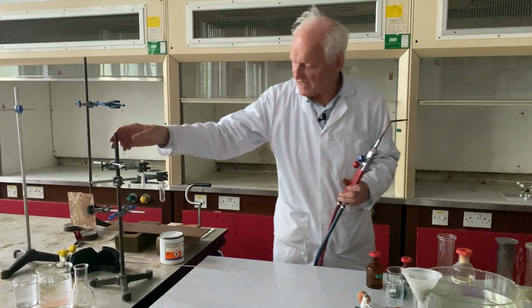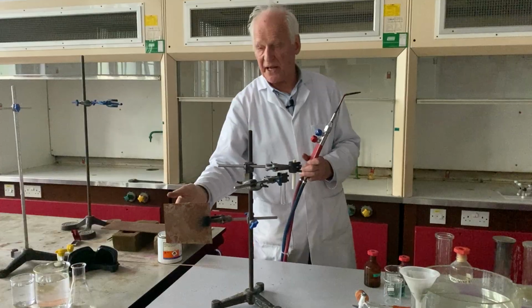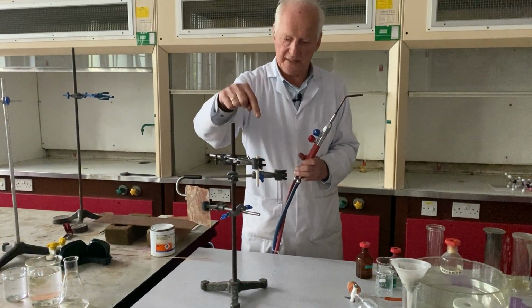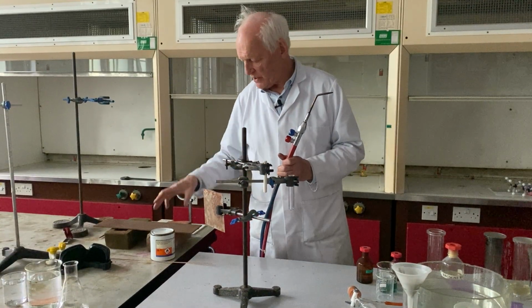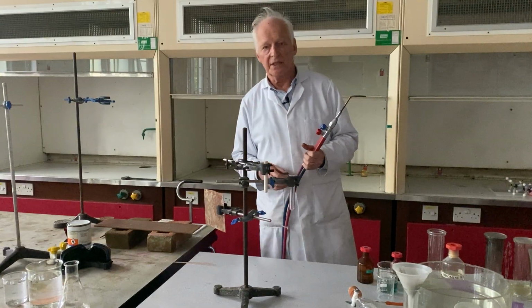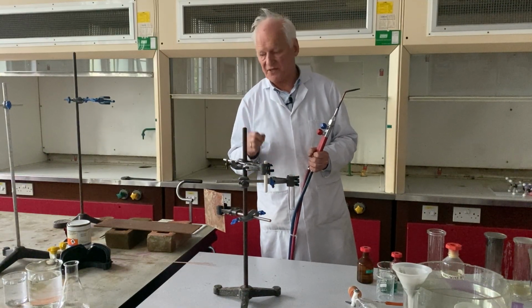In my retort stand here, I have got 3 items. One of them you see is a plate of steel, one of them is a glass test tube, and here is a stick of chalk. And I'm going to show you, in turn, one at a time, what happens when each of these are subjected to the very high temperature of an oxyacetylene flame.